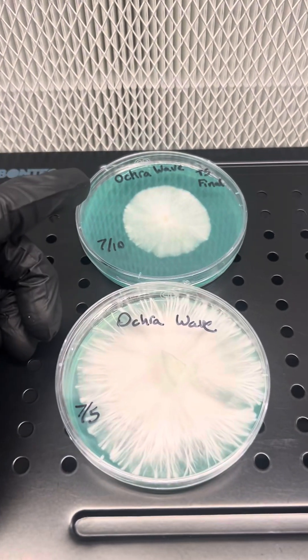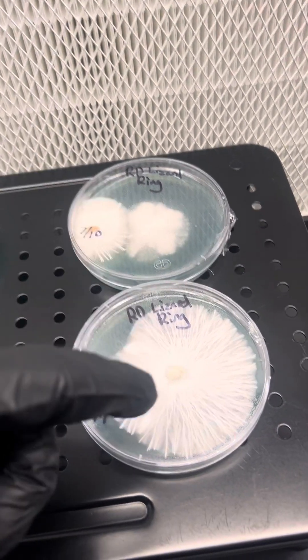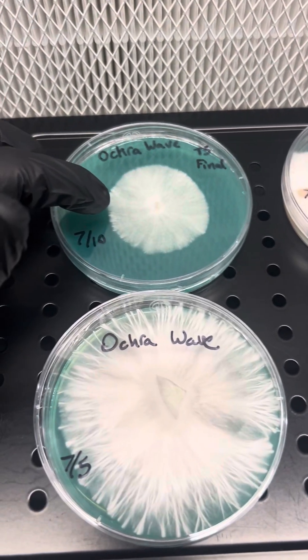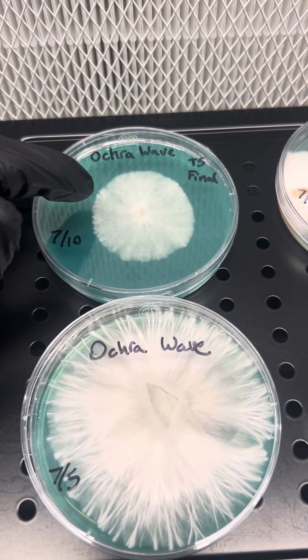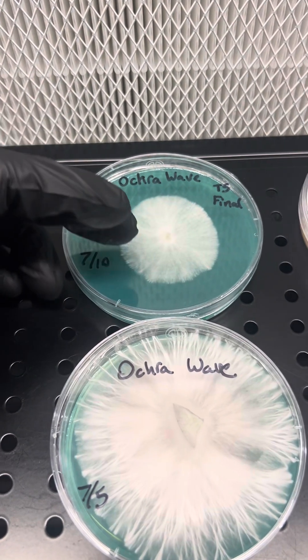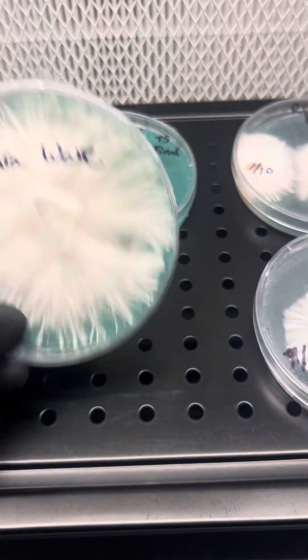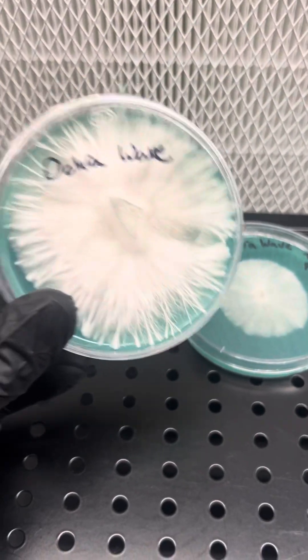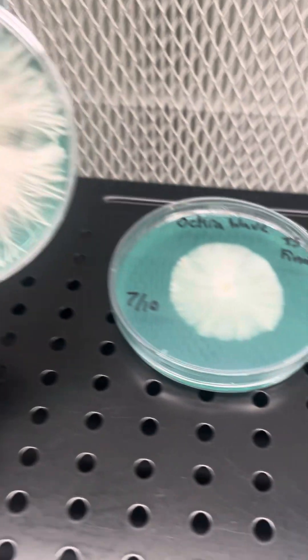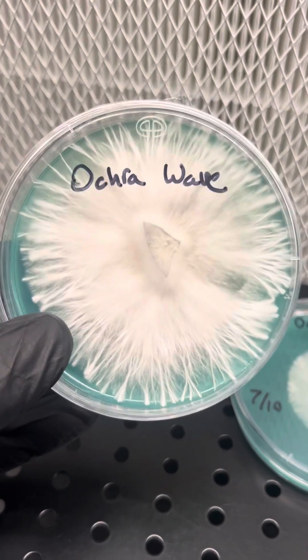Isolating a culture is different than taking tissue samples and cloning a mushroom. For example, this is a tissue sample of something that's already been isolated — I just took it from another tub, so we'll just say that's another tissue sample. Right here is an isolation. This was grown out over multiple agar transfers, and it came from multiple plates to get from this to this. That is an isolation.